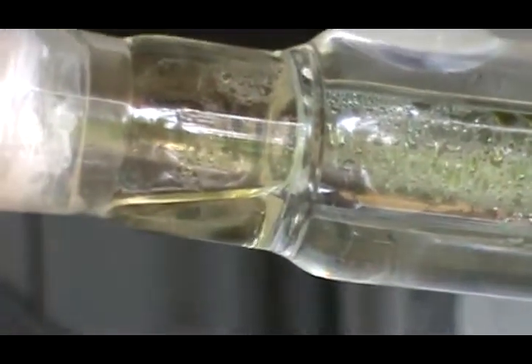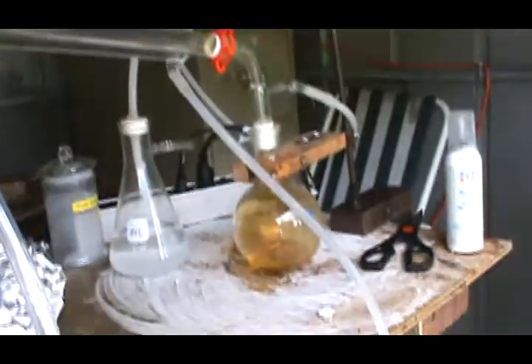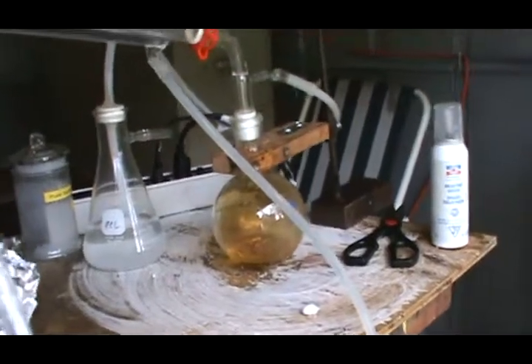This right here would be white fuming nitric acid, but I don't have a fractionating column and I don't have a way to change out my receiving flask for each fraction. So I just let it all go into one, and then I'll worry about it later.